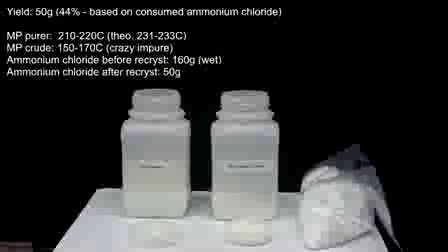I measured the melting points of the crude and the more pure methylamine, and you can see here that both are not super pure. The more pure methylamine probably contains a little bit of ammonium chloride, which lowers the melting point, and the crude one probably contains a lot. Before the crude stuff can be used in any synthesis, I think it's pretty much mandatory that it gets recrystallized.